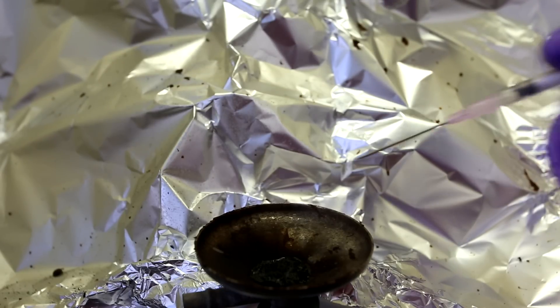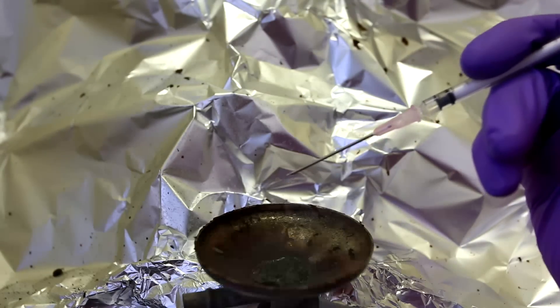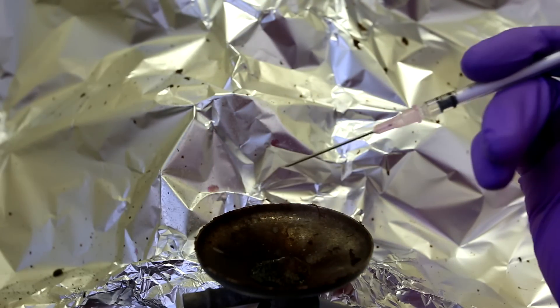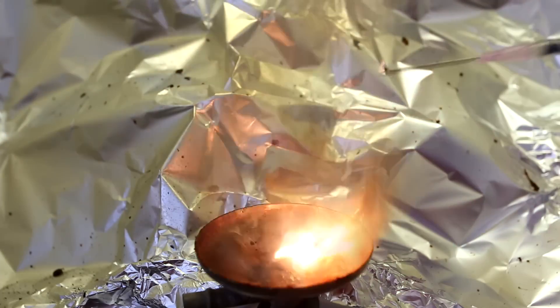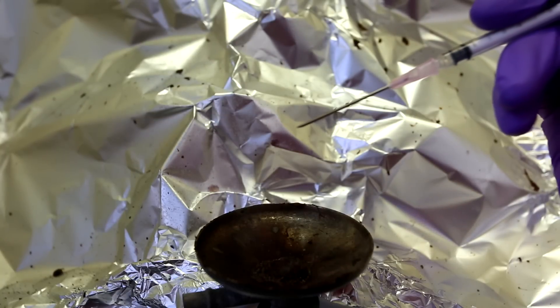In the clip that I just showed, the manganese heptoxide explosively oxidized the acetone. This violent and exothermic reaction should occur with most, if not all, organic solvents.